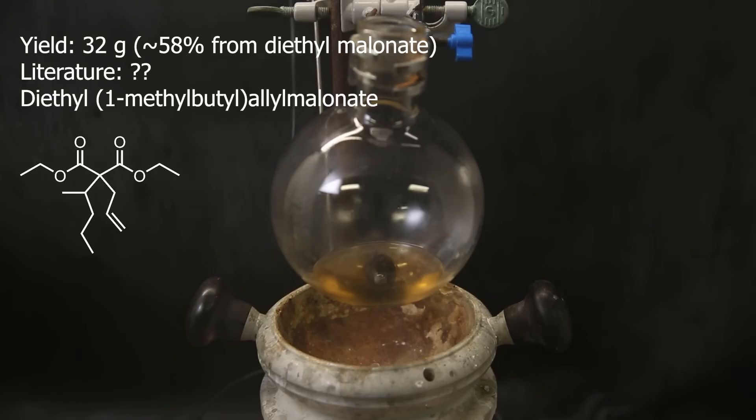In the end, I am left with 32 grams of what is mostly the product, diethyl 1-methylbutyl allyl malonate, giving an overall yield of about 58%, including impurities. And I can just use it like this for the next reaction.